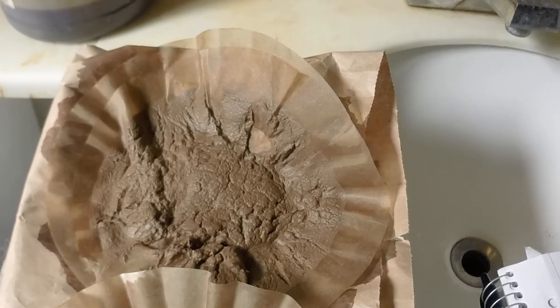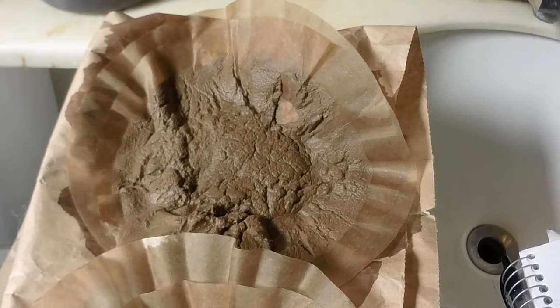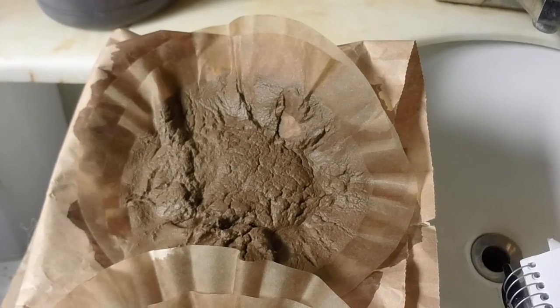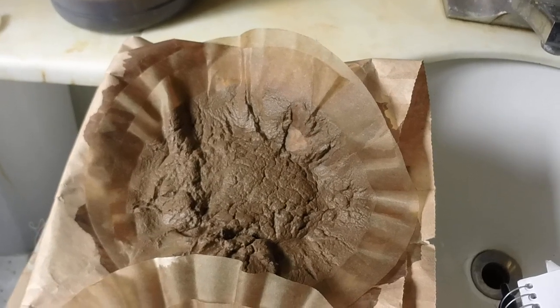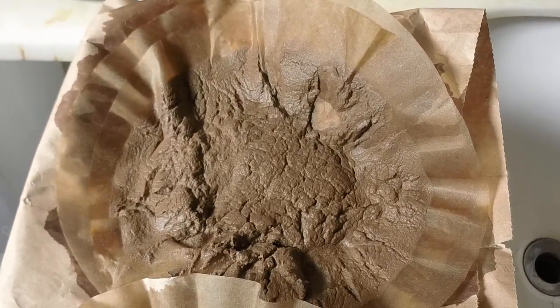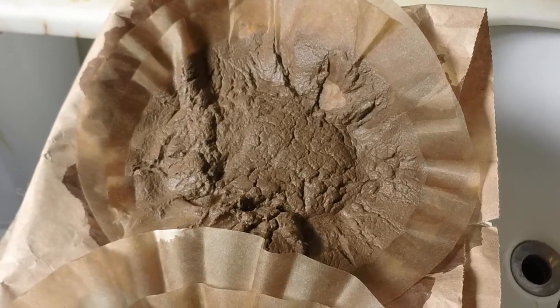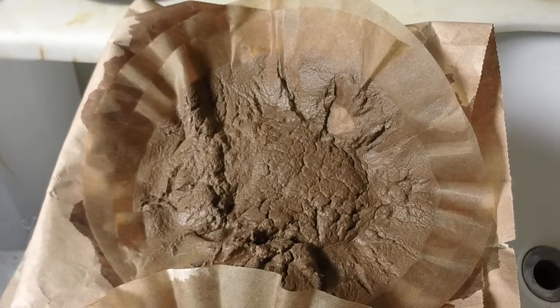You got your batch of crystals, you splash them with some more vinegar and add water until you have the proper concentration of solution to hit it with your saline solution and get it to effectively crystallize out again. And I've really never seen a reference to what that proportion is. We've been following Manski's lead up to now, except for the freebase step. Once I re-acidify it and Manski it, but once I hit that with a splash of vinegar and get it to go back into solution again, I have no idea what kind of volume of water I should use. I guess minimal — I'll go with minimal. I'm not sure what minimal is yet, but you'll find out when I find out.